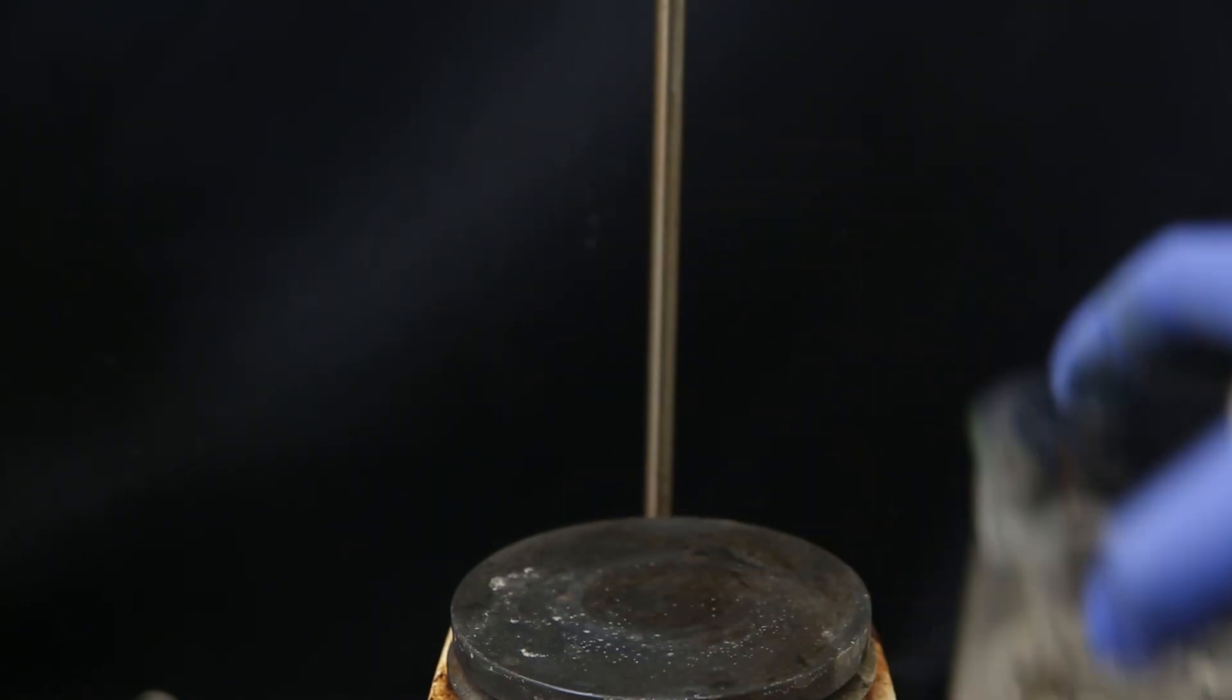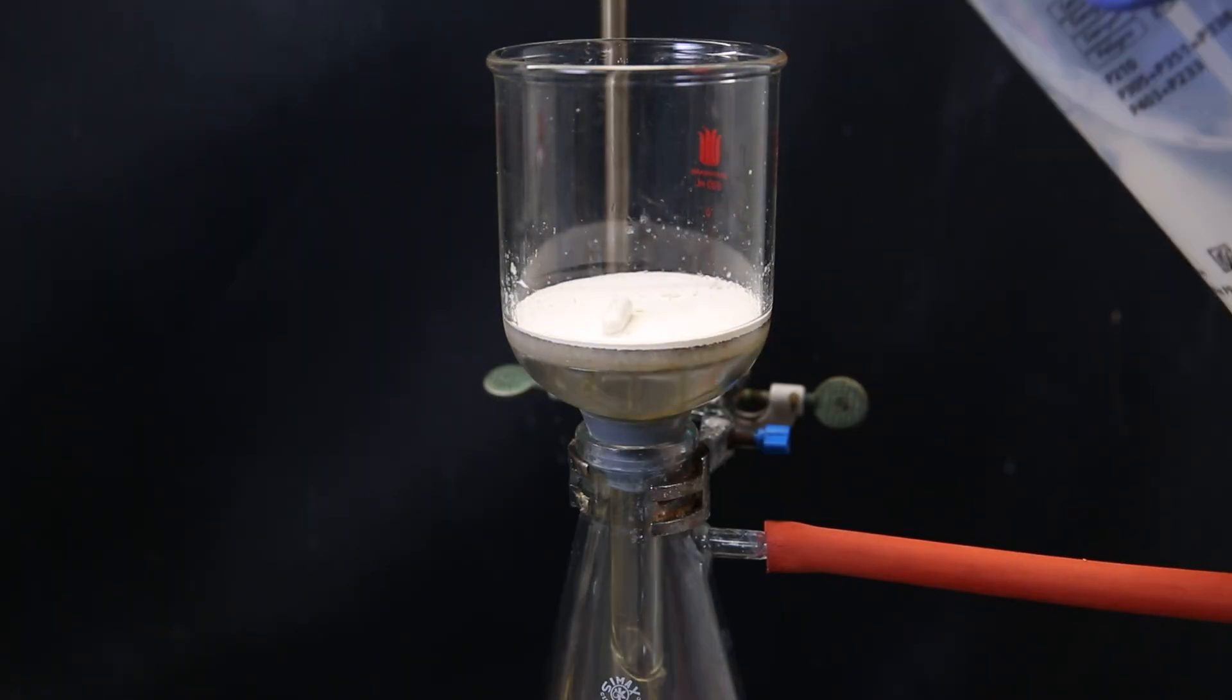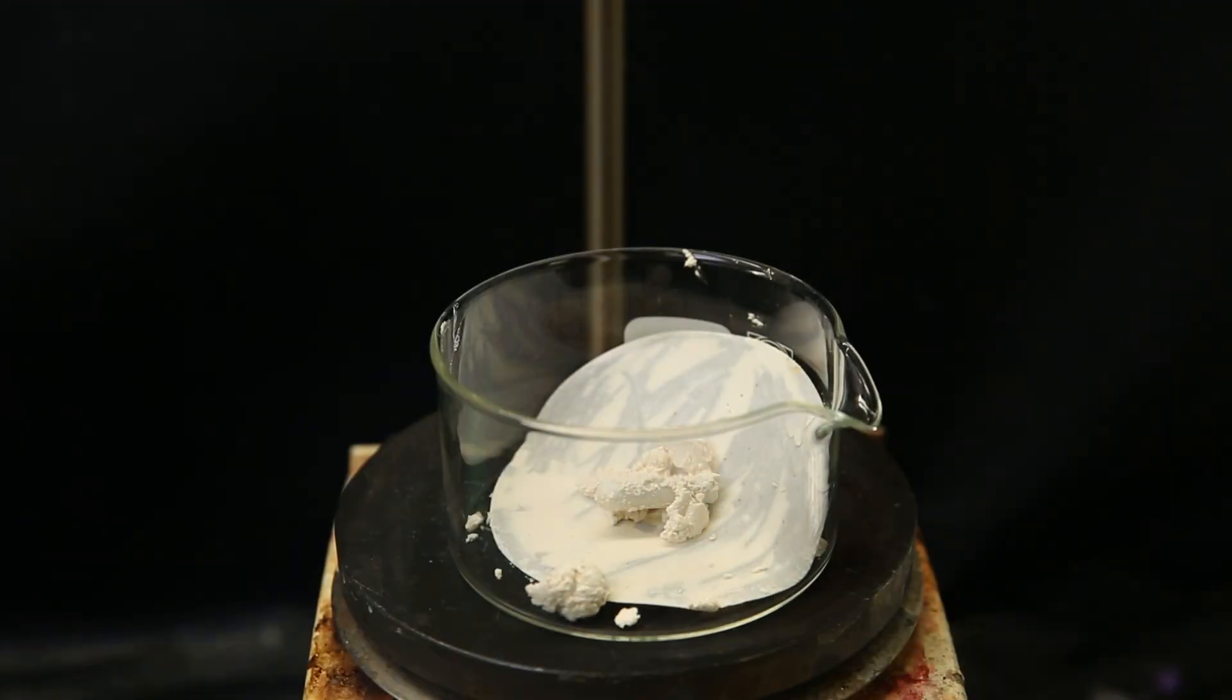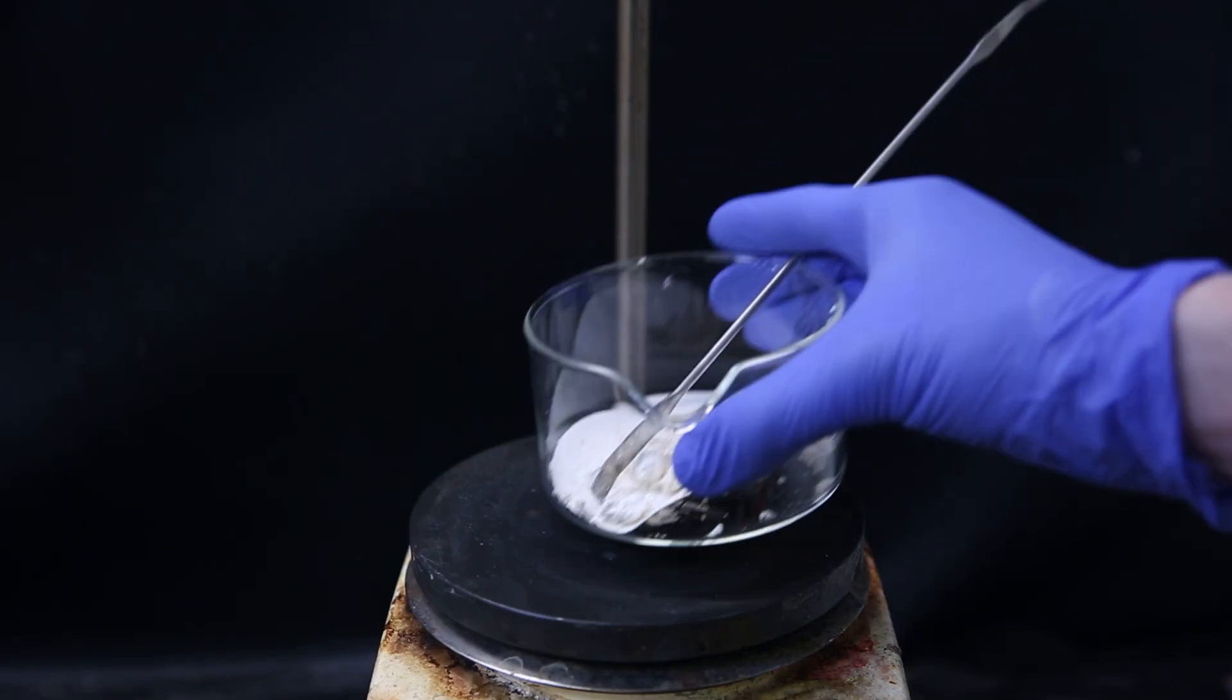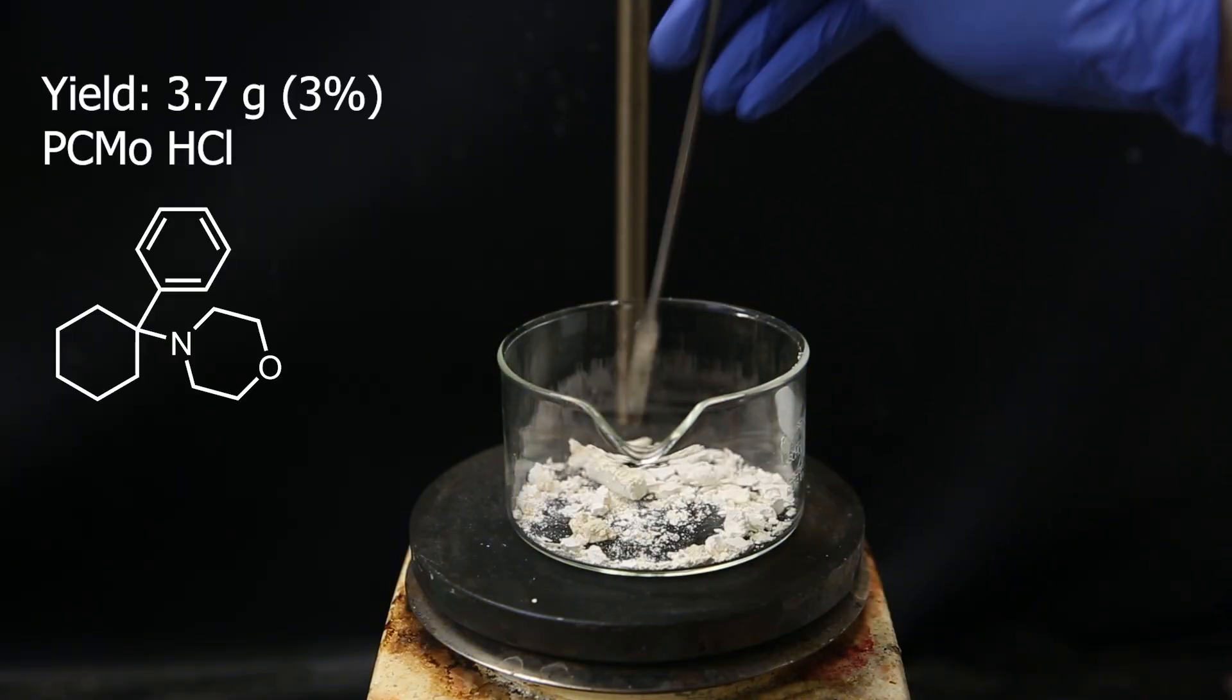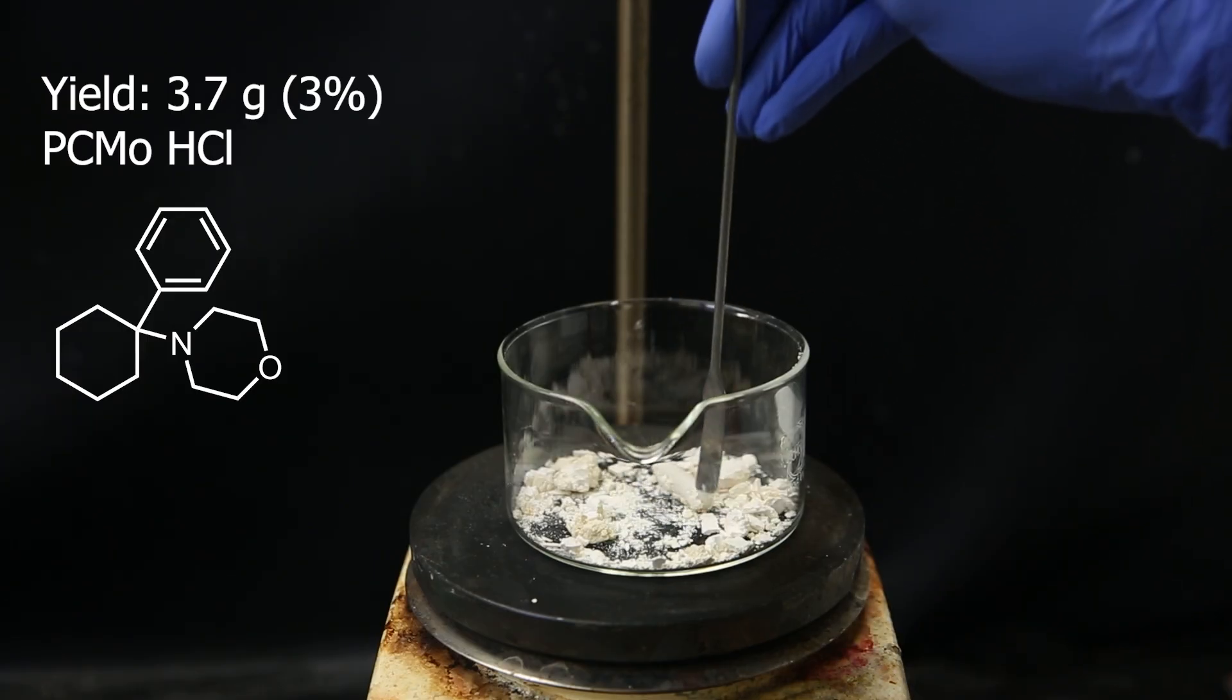I then set this up for vacuum filtration, and wash it with some more acetone, leaving behind the product as an almost white solid. I move all of the collected solid to this dish, and then set it in the oven at 50°C overnight, to remove remaining acetone. When that's done, it easily crumbles into a powder, giving a pathetic yield of 3.7 grams, or 3% of the PCMO hydrochloride.